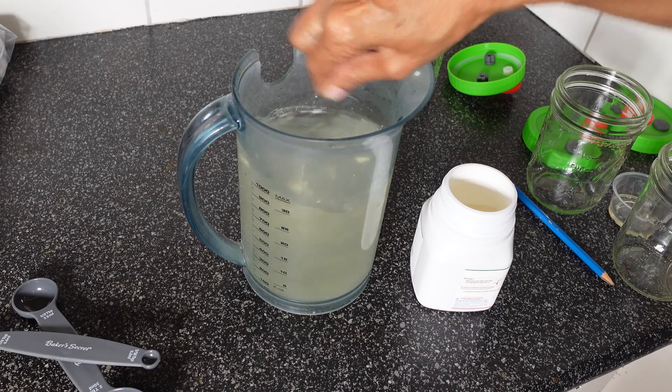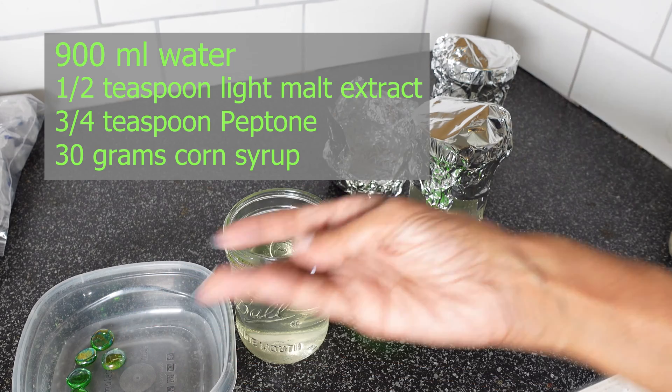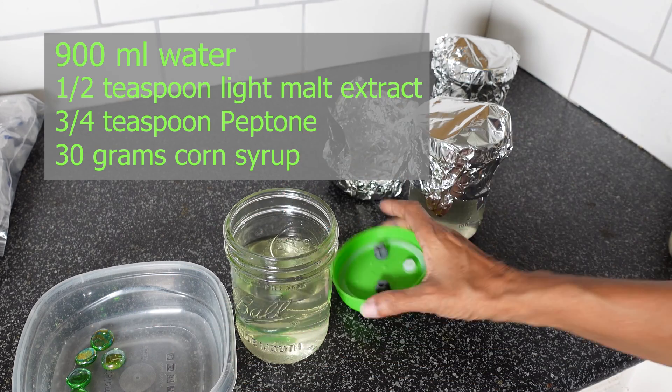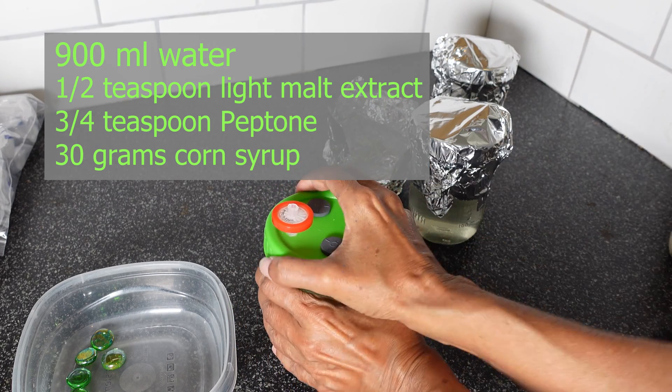Stir thoroughly to ensure the ingredients are completely dissolved. One or two glass beads were added to each jar. These will help to stir the solution once the spores are added.